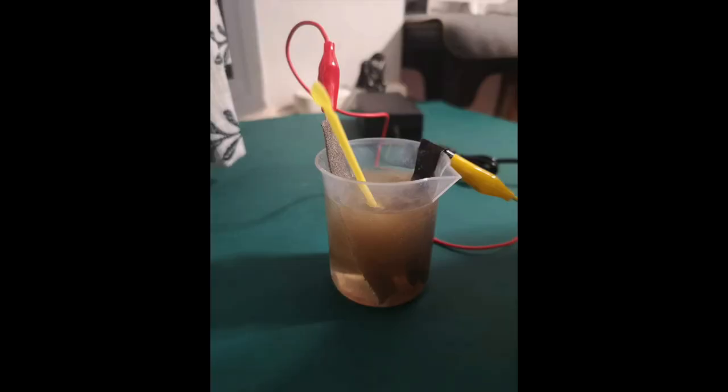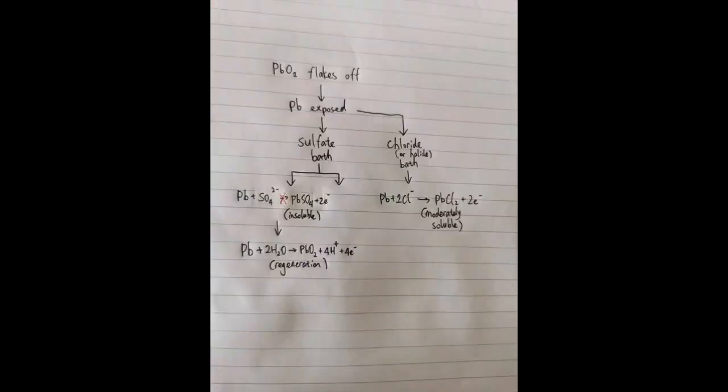I tested this again using a smaller cell, and it showed the exact same result. Here is the supposed mechanism. So my lead anode keeps flaking off lead dioxide and exposing fresh lead metal. In sulfate-based baths, the lead metal does not move in solution since lead sulfate is insoluble. Therefore, it quickly oxidizes to lead dioxide on the surface again. But in chloride-based baths, lead moves into solution as lead chloride, and this gradually consumes the lead metal.